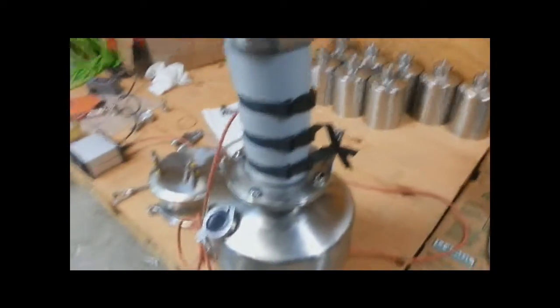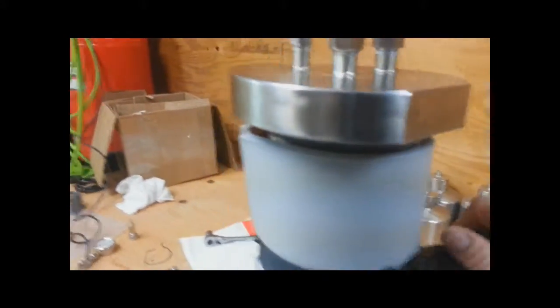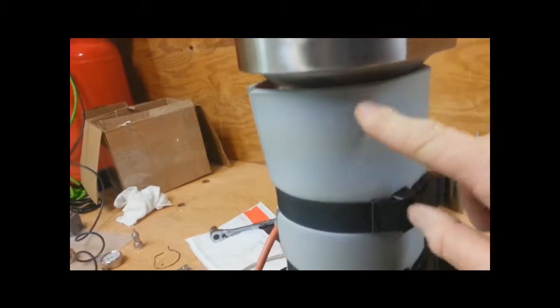Okay, see the straps on this TE3000 column or plant holding container tank, however you guys want to call it. I call it a column, a plant column. So it's got four straps on it: one, two, three, and another one goes right here.